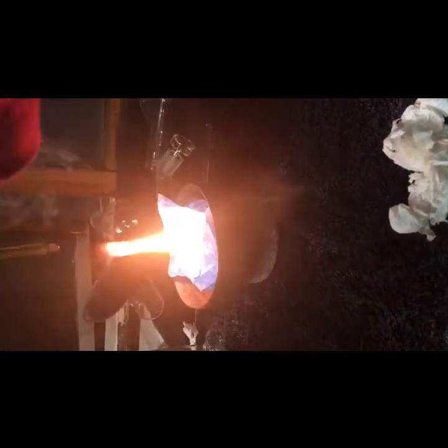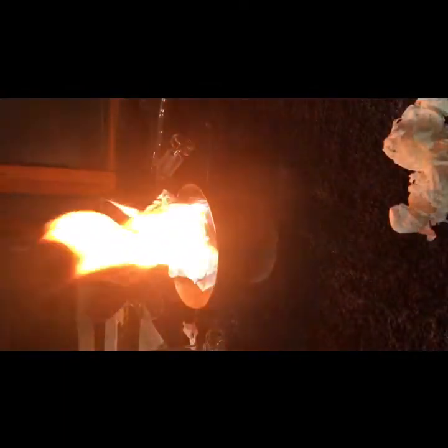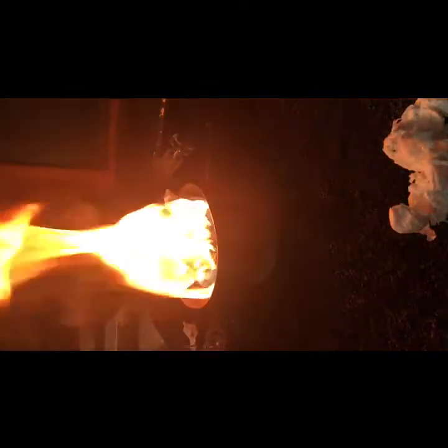As you can see, it fumes a lot. That pipette is only one milliliter, so it doesn't take much to ignite the glove.